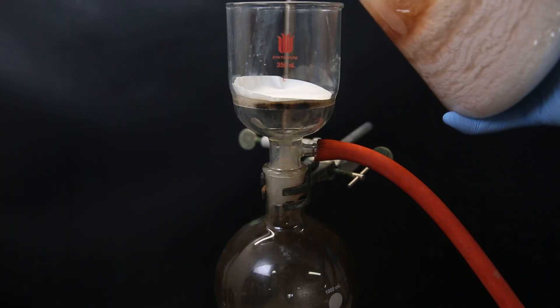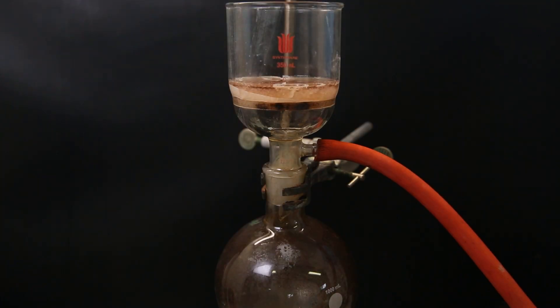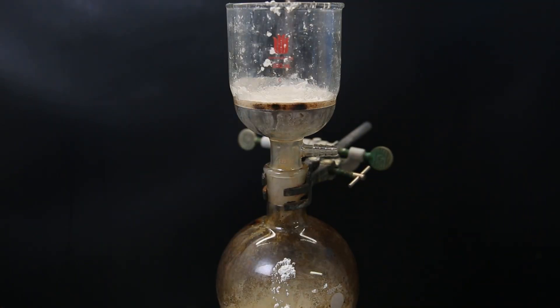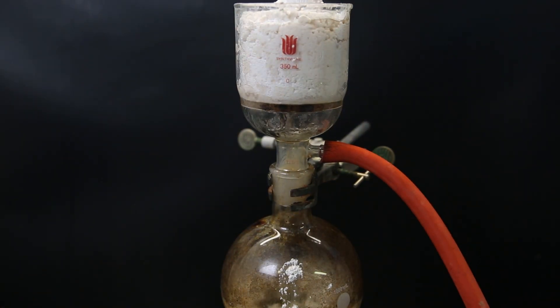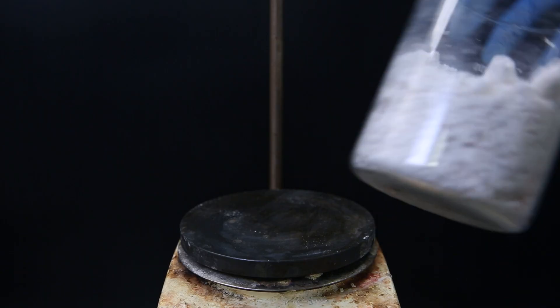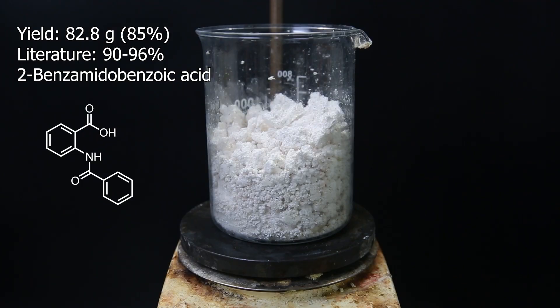After that, I collect all the precipitated product with vacuum filtration. The product is very soggy, and it fills the filter twice. I washed it with water and hexane. I then set it in the oven at 120C for a few hours to dry it out. The texture of this compound is very weird, so I'm not sure if it is completely dry. If I assume it is dry, the yield is 82.8 grams, which is 85%, and pretty close to literature.